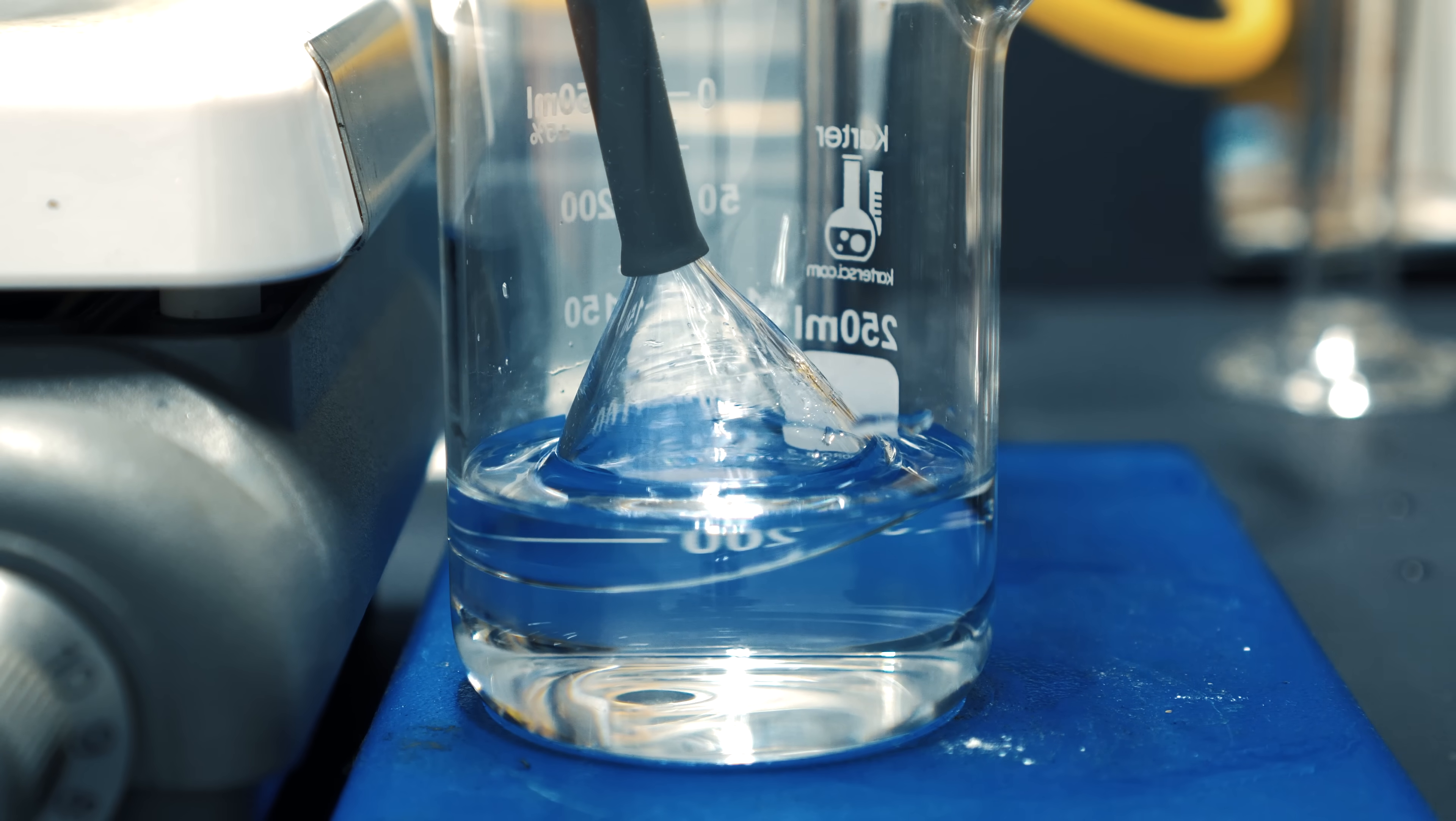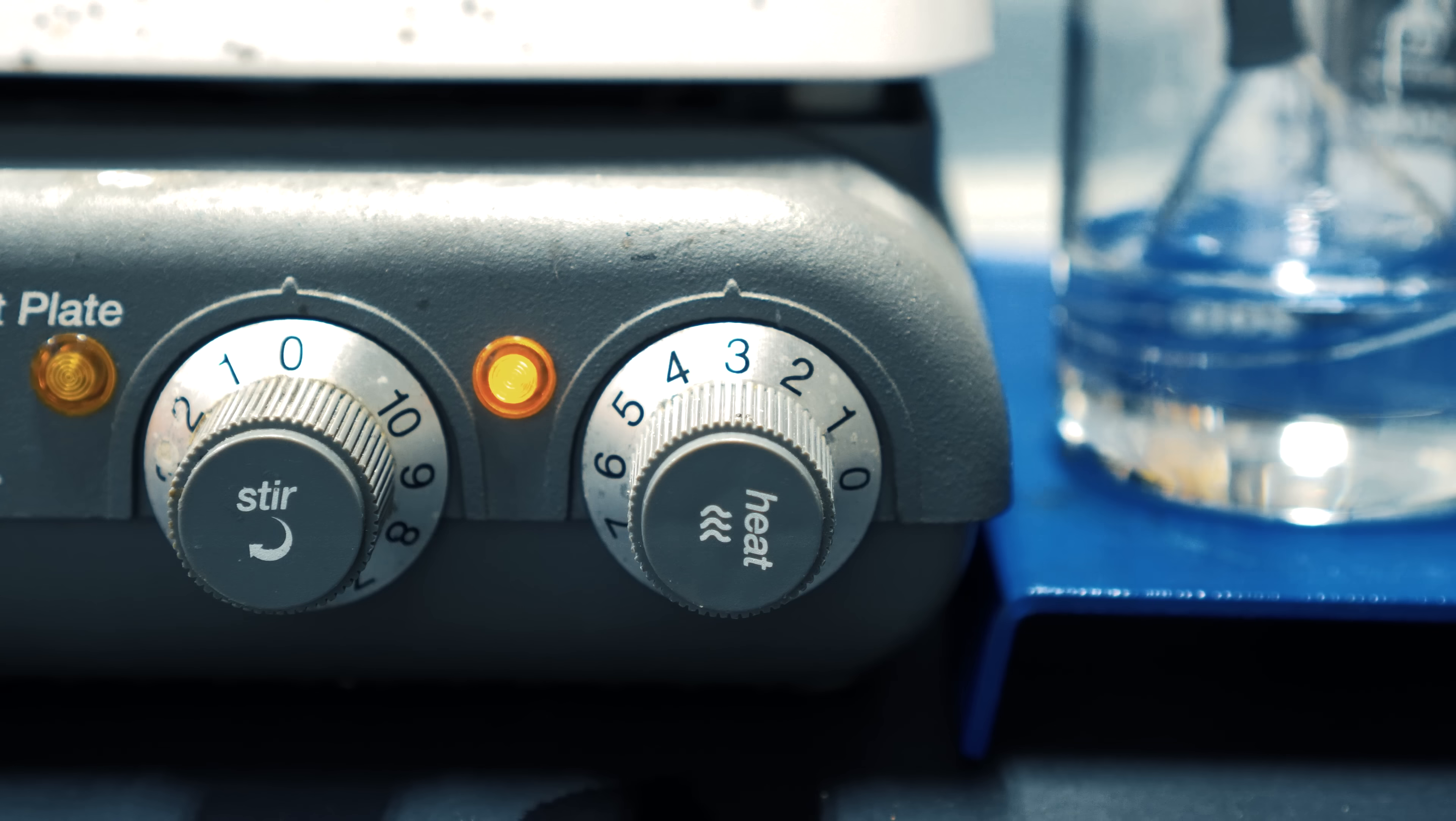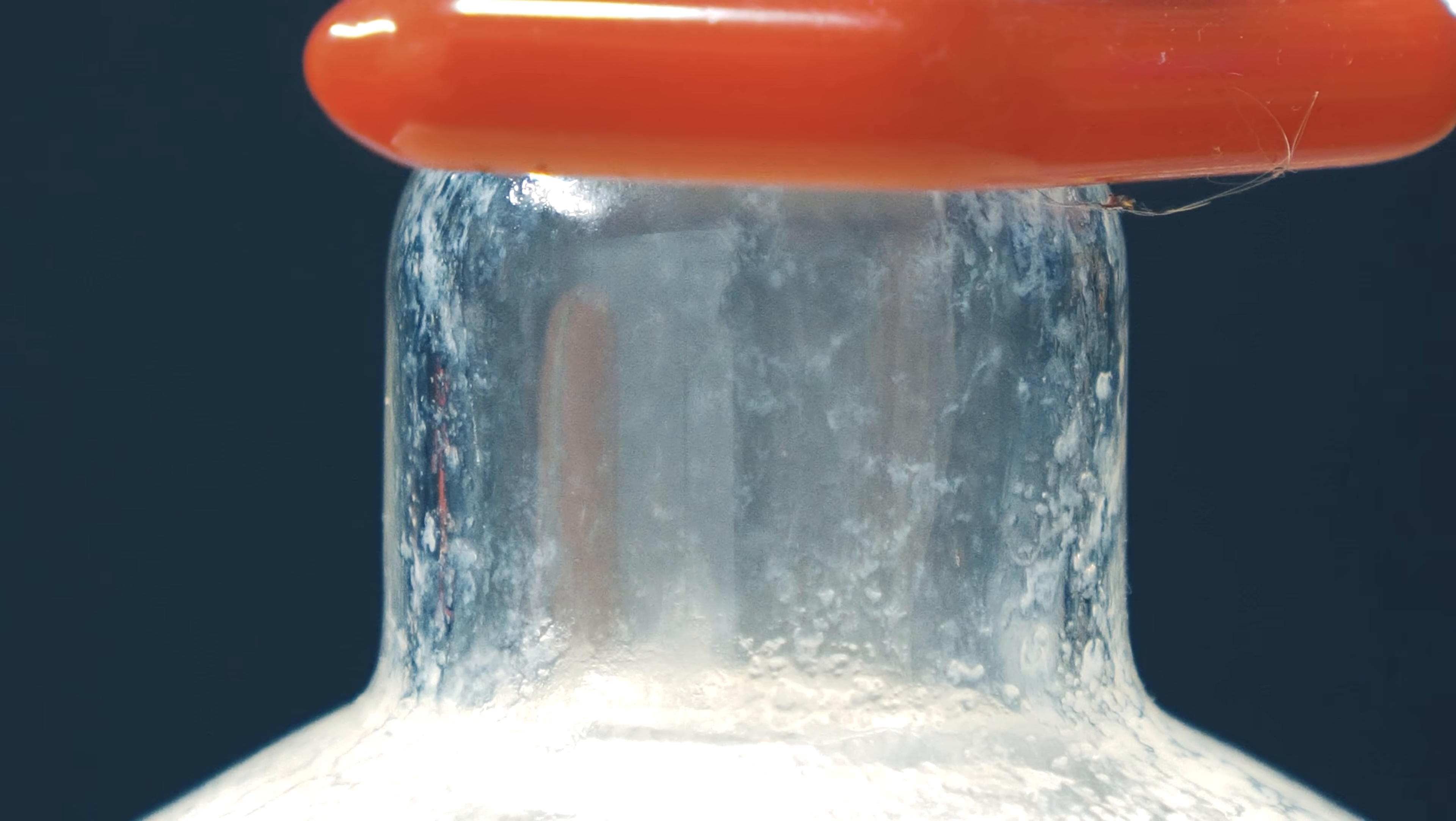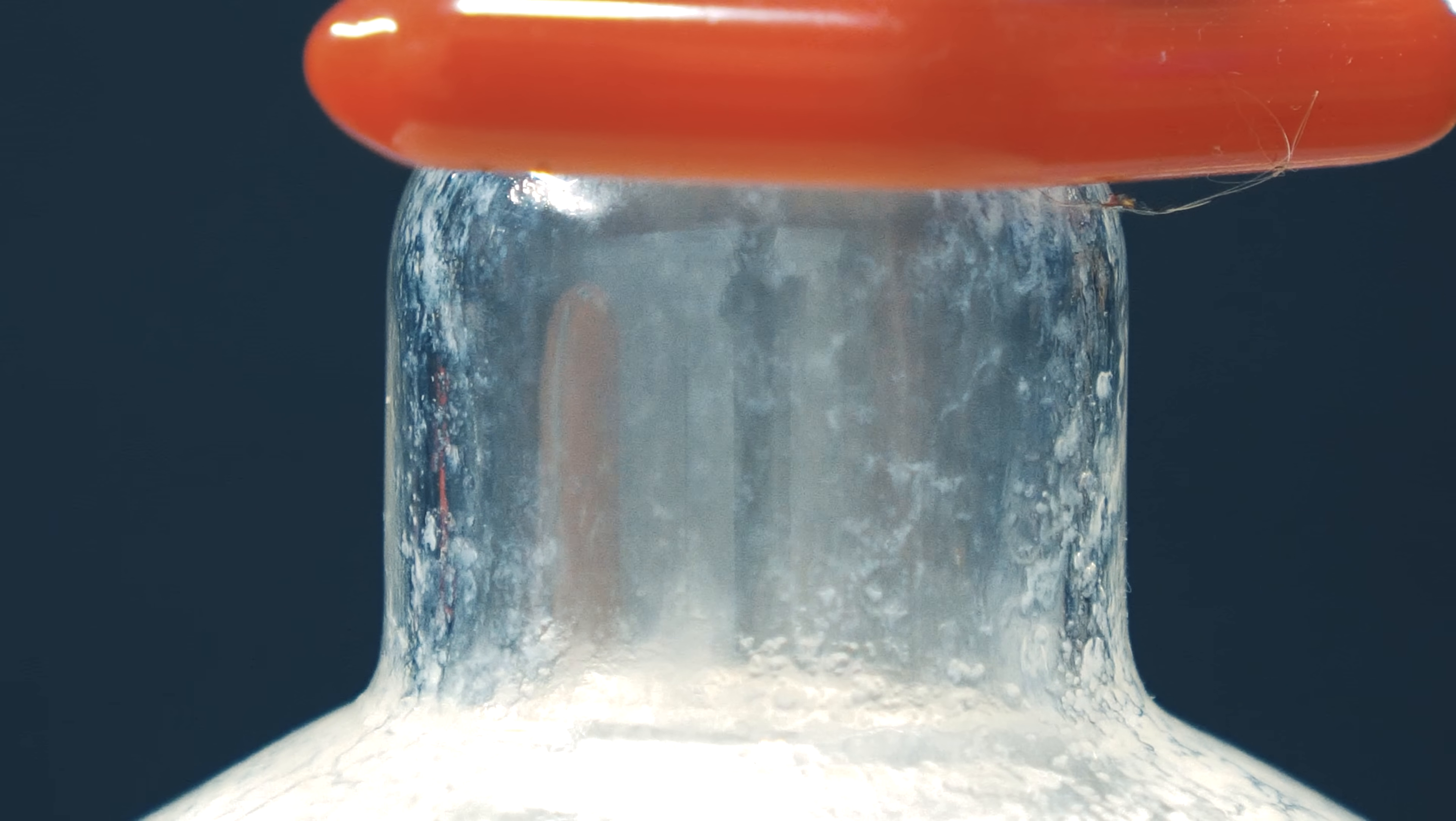After everything was set up, I turned on the heating and I only put it up a little bit. As I was heating up the solution, we can see this really cool white gas inside of there. I'm not really sure what it is and if someone knows, put it down in the comments.